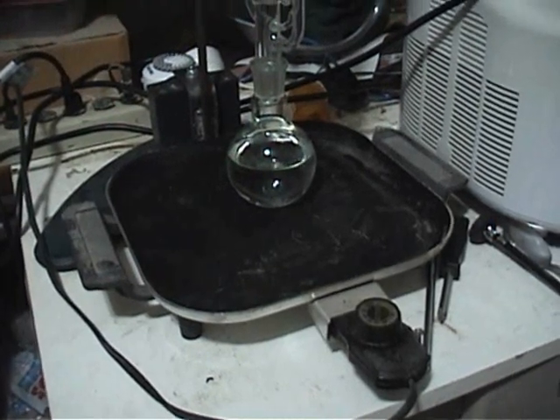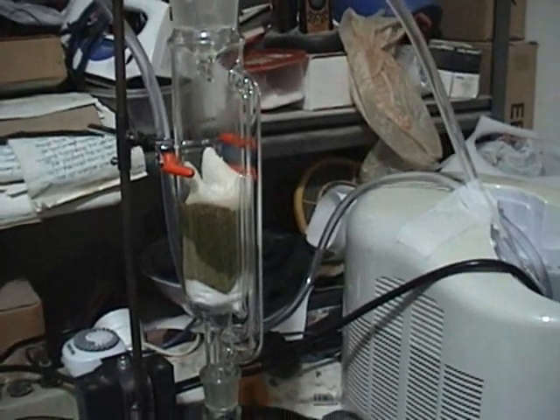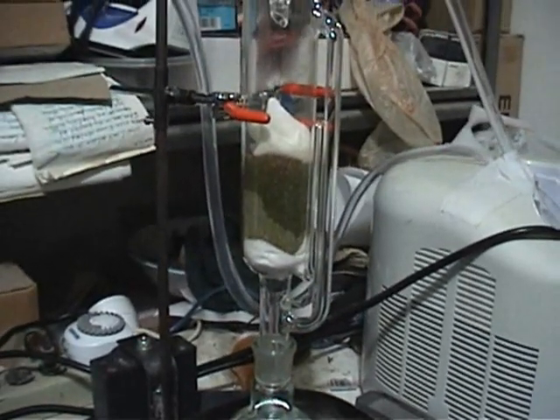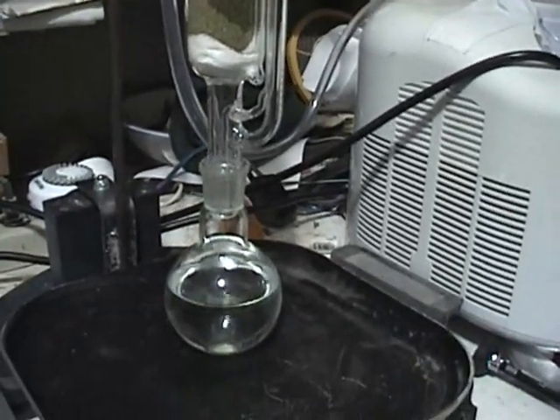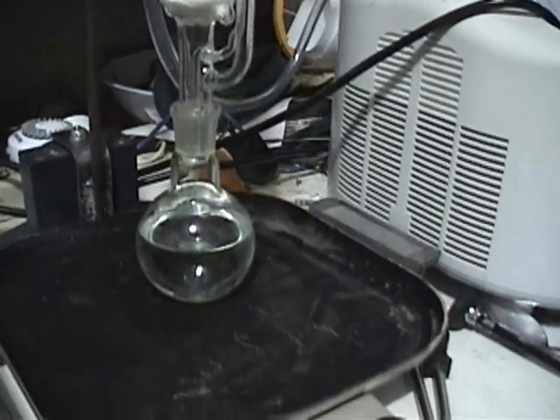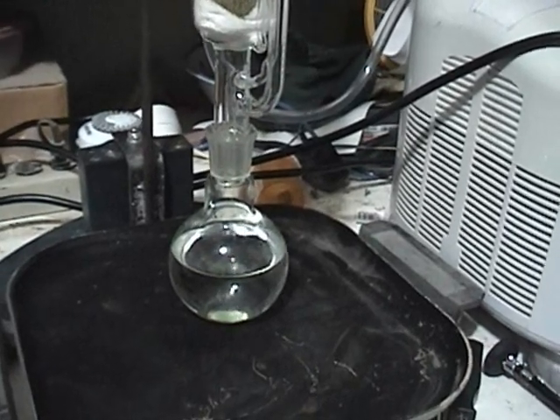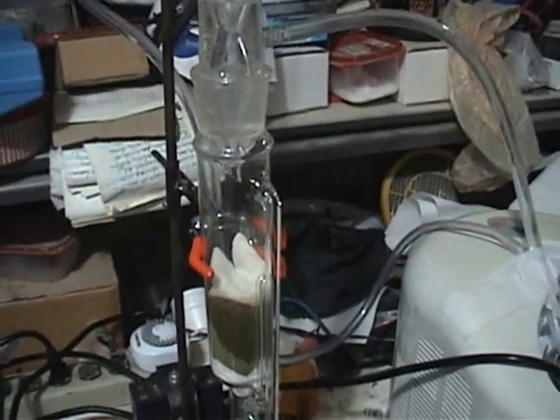This is a little demo of my Soxhlet extractor I finally got set up. I just started getting hot enough to start the process. You can see my materials getting a little wetted from the condensate that's falling down through there. Not boiling very vigorously — I'm going to have to do something about a better heat source. I just have this old hot plate or electric skillet pressed into service here and it doesn't couple the heat very well into the flask.